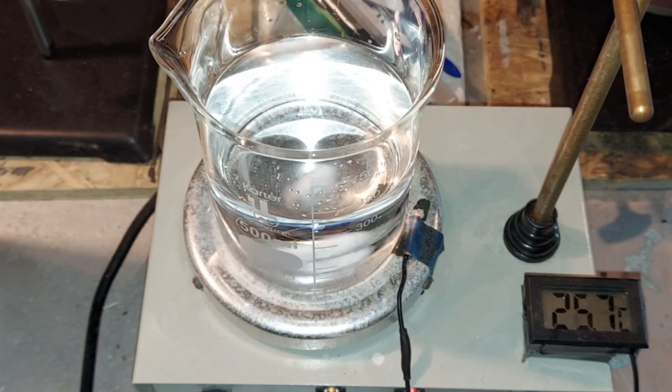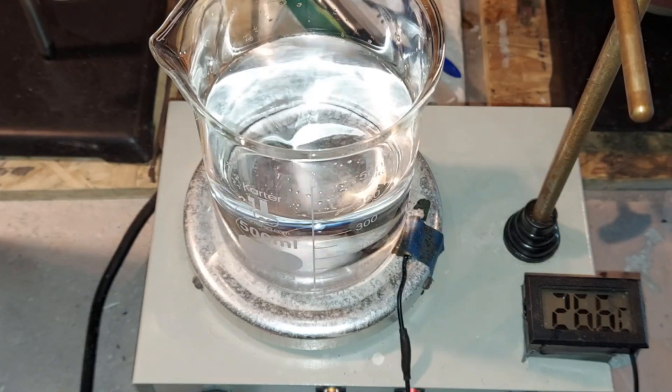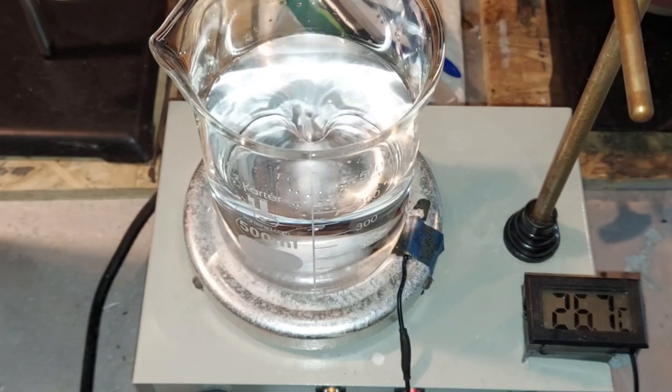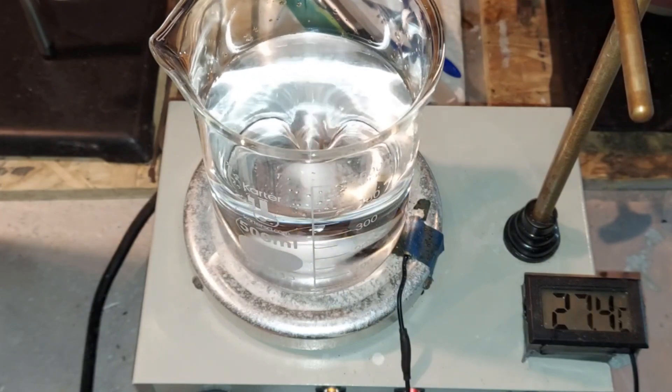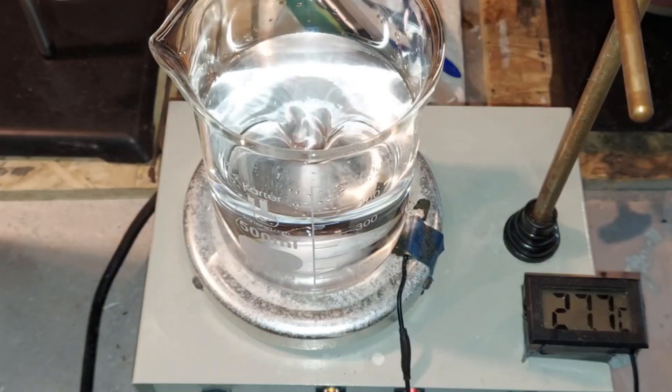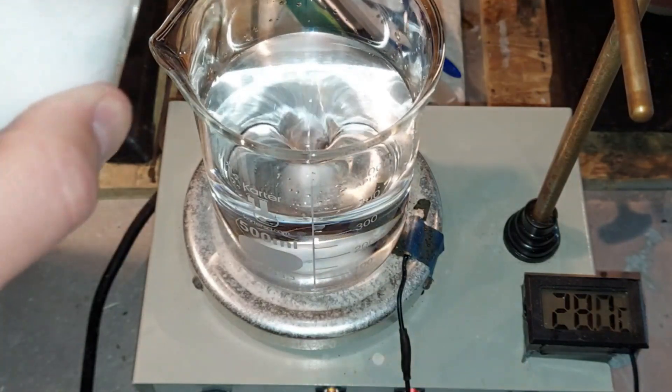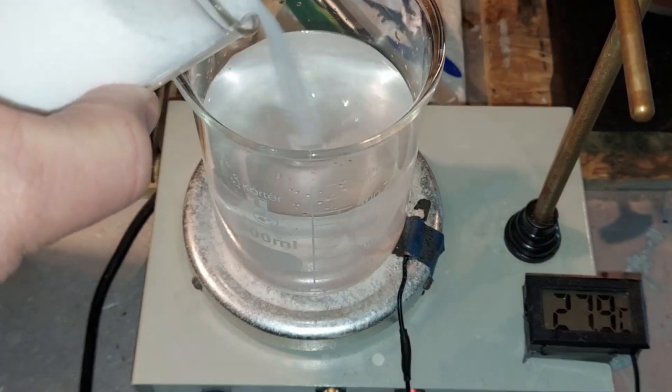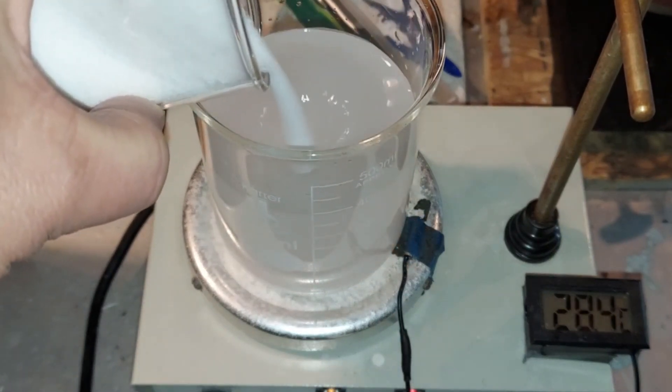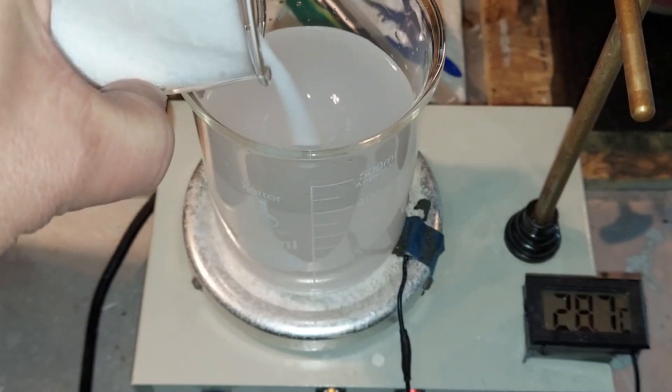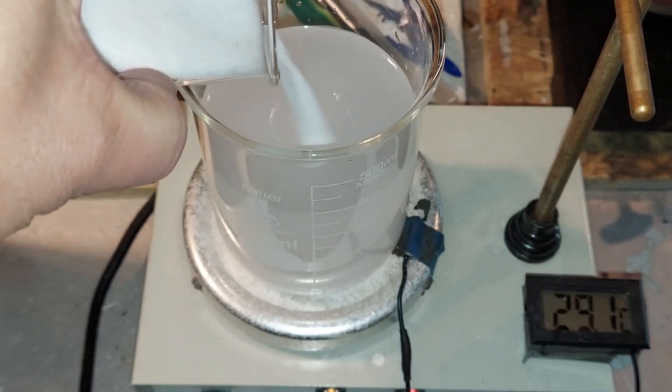I have my 350 milliliters of distilled water here. I'm gonna start spinning this around. The water is really close to 20 degrees C. The heat coming from the hot plate is a little higher there, but that's the hot plate, not the water. Okay. In goes the 118.9 grams of KCl. No reason to add it slow.